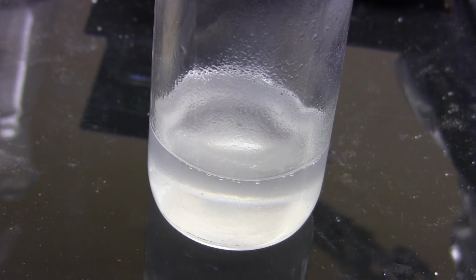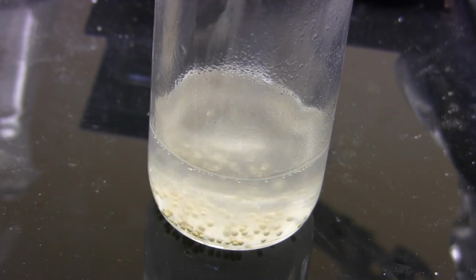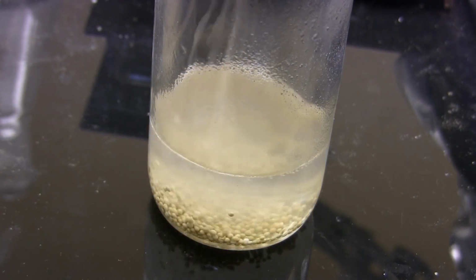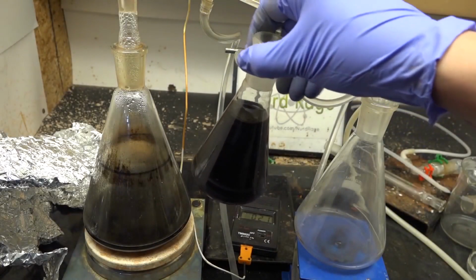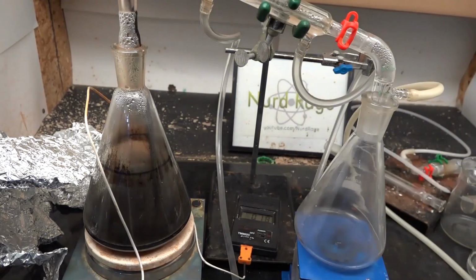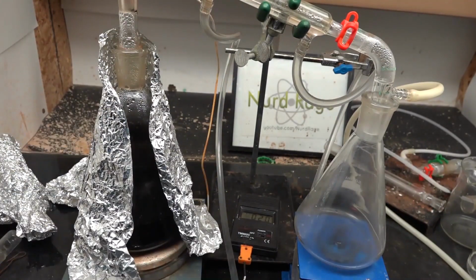To be absolutely sure, I sent off a sample for NMR analysis. As you can see, the clean spectrum shows we have indeed produced pure para-chlorotoluene. Now for storage, I recommend adding some molecular sieves to remove the cloudiness that comes from suspended water droplets. As for the orthochlorotoluene sulfonates, we can now convert back to orthochlorotoluene. The process is actually quite simple. Just gradually heat the mixture and distill off the water and orthochlorotoluene.